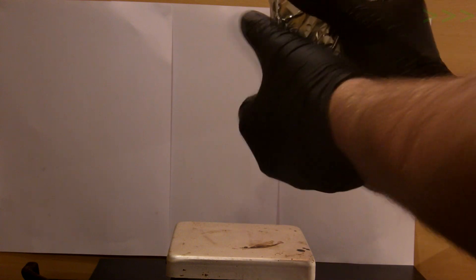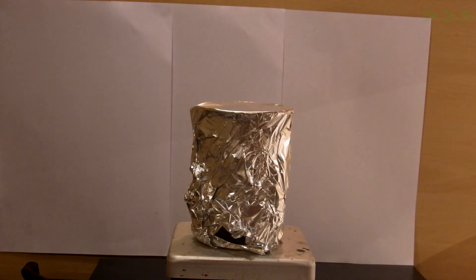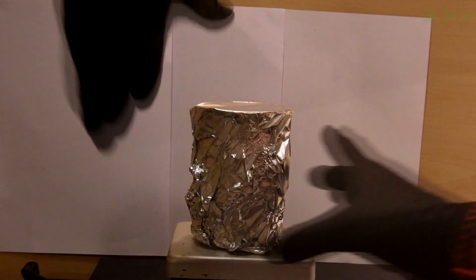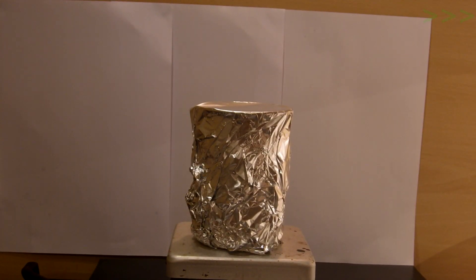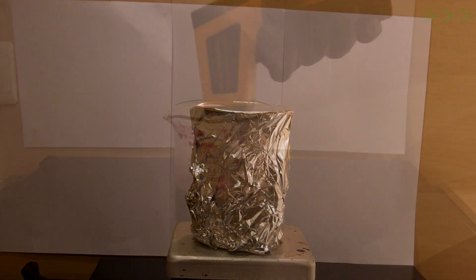Now just chill the solution to zero Celsius. You can put this in a thermos. Larger crystals are possible, but keep in mind that ammonium permanganate decomposes and does so in noticeable speed when in solution and warm.